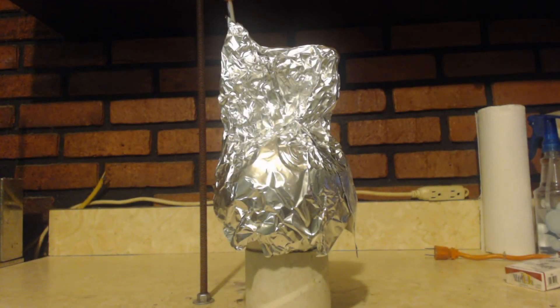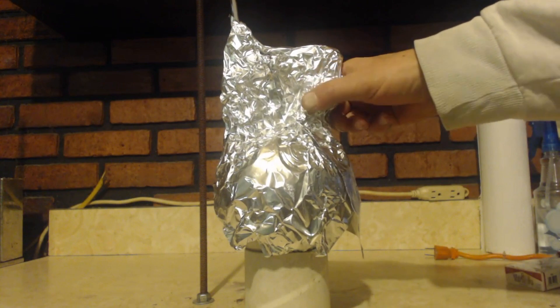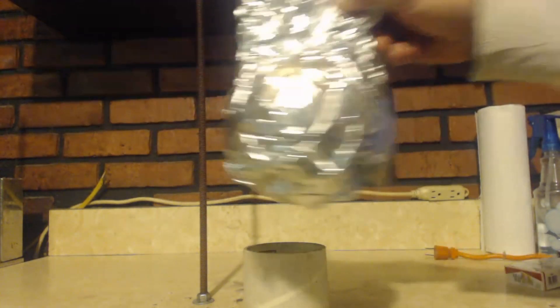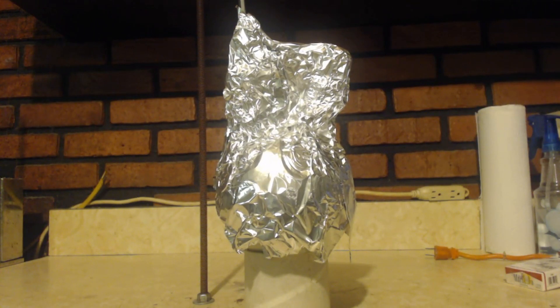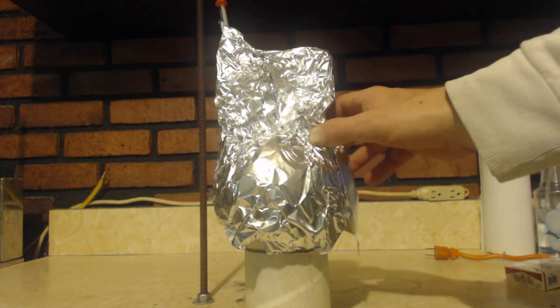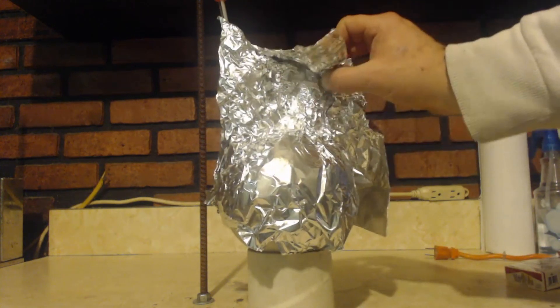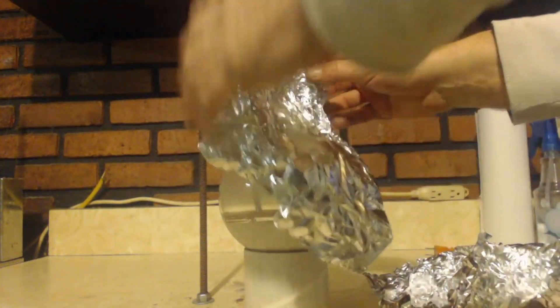For about six hours last night I put aluminum foil on this because I don't want sunlight screwing up any of my chemicals. I just shook it like this, only about three times an hour. Now, seven and a half hours later, everything was still yellow. So I let this sit for eight hours while I slept with nothing stirred, and I'm hoping something happened.